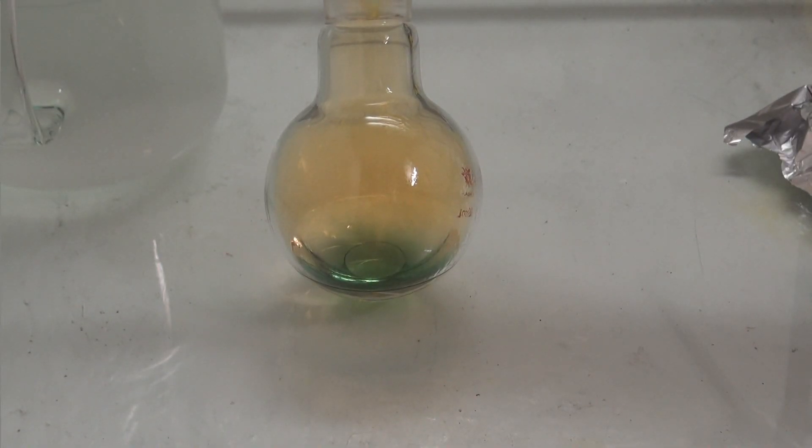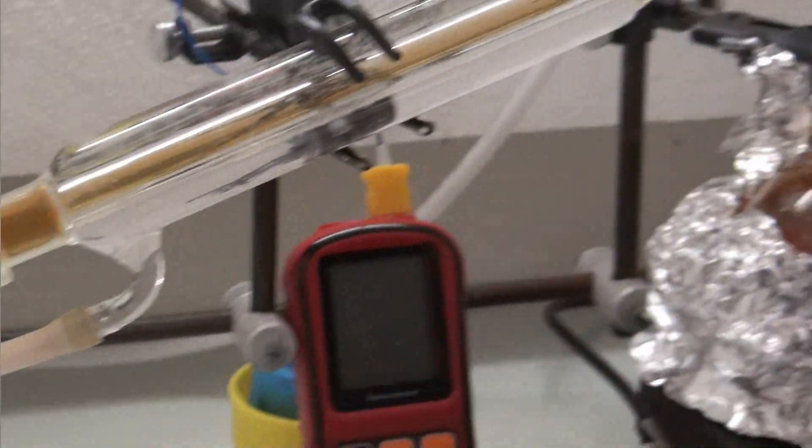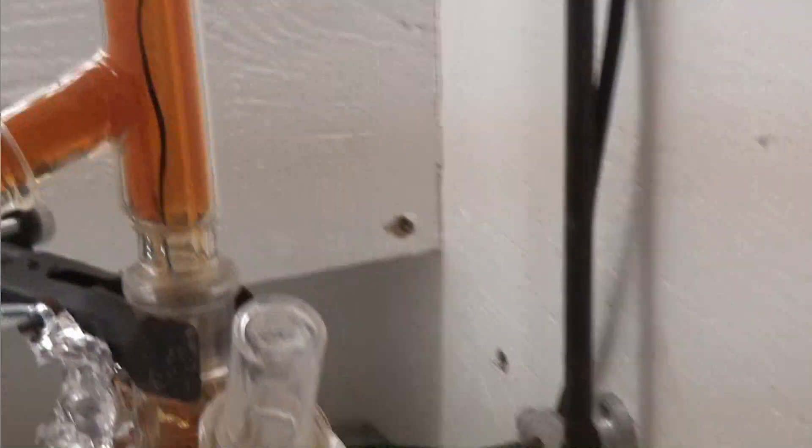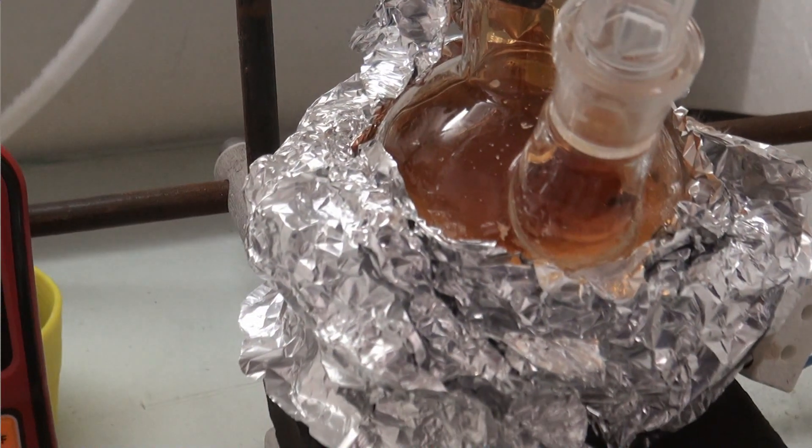One hour later, the distillate became slightly green. I was uncertain why this was happening, because the flask was clean, which must mean that the compound giving this color is volatile and came over with the other distillate.